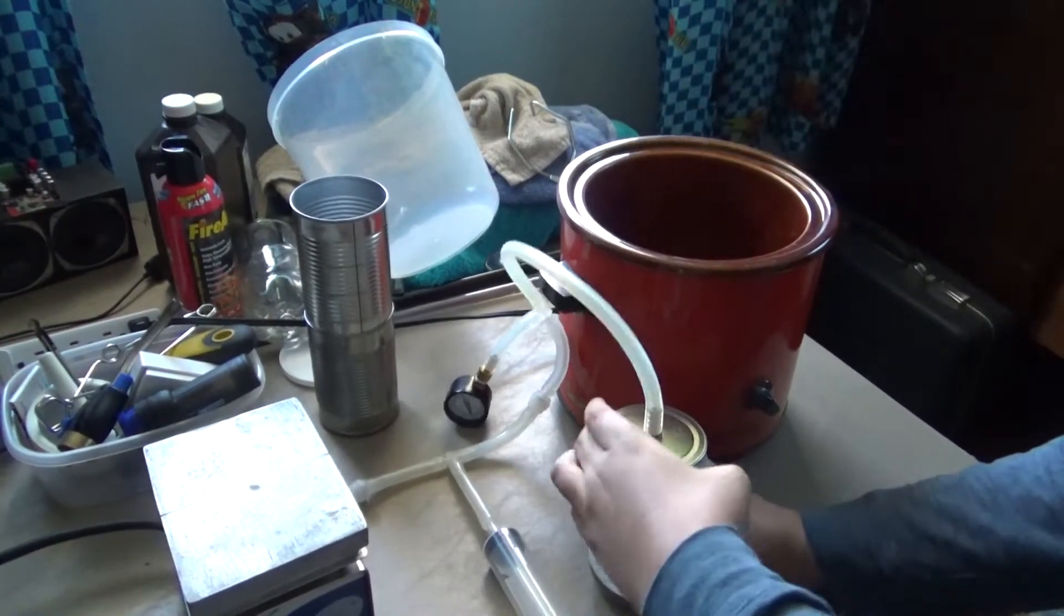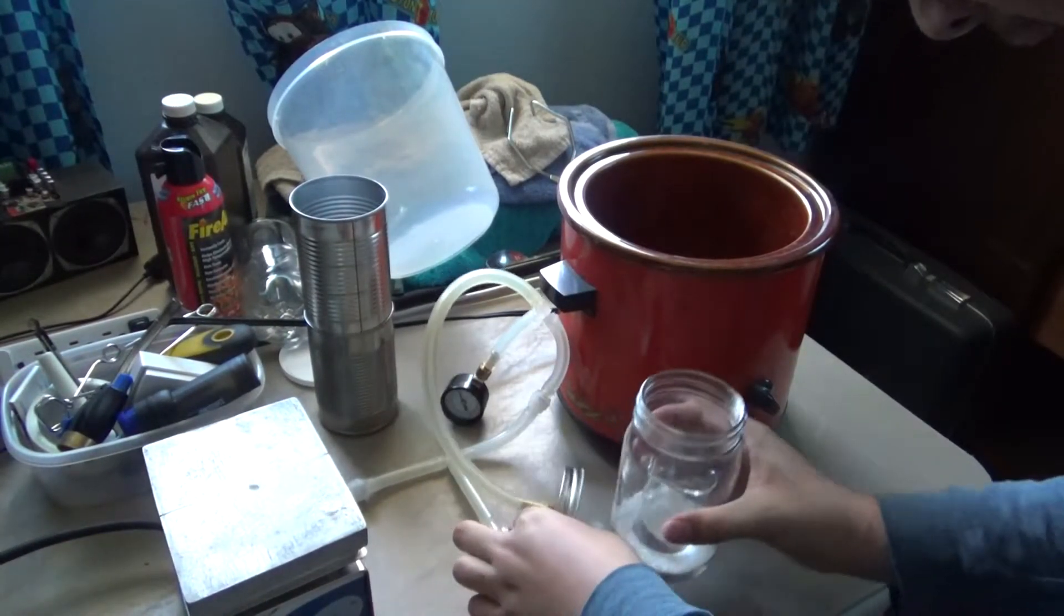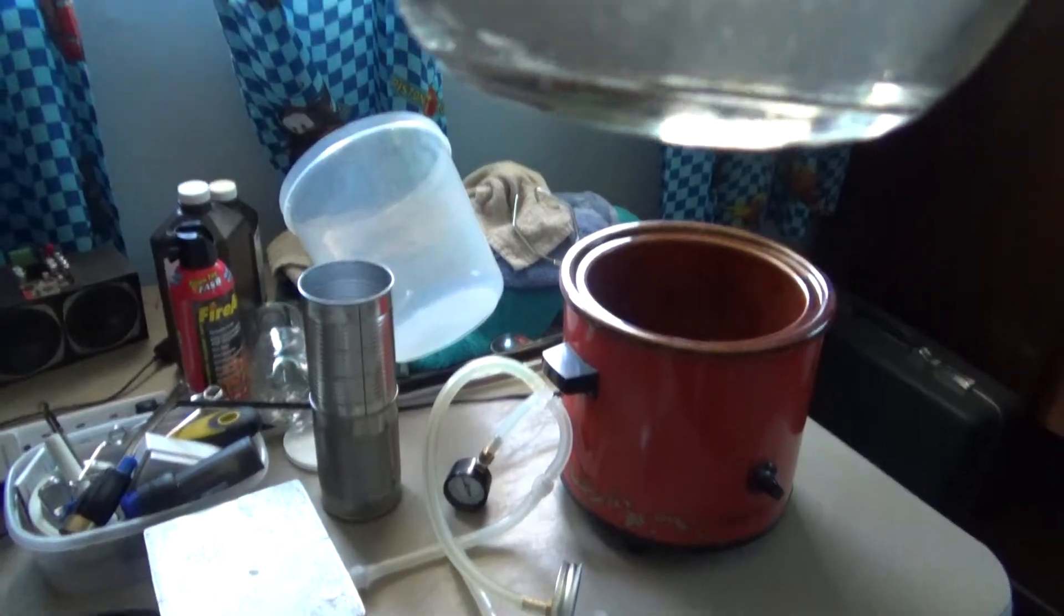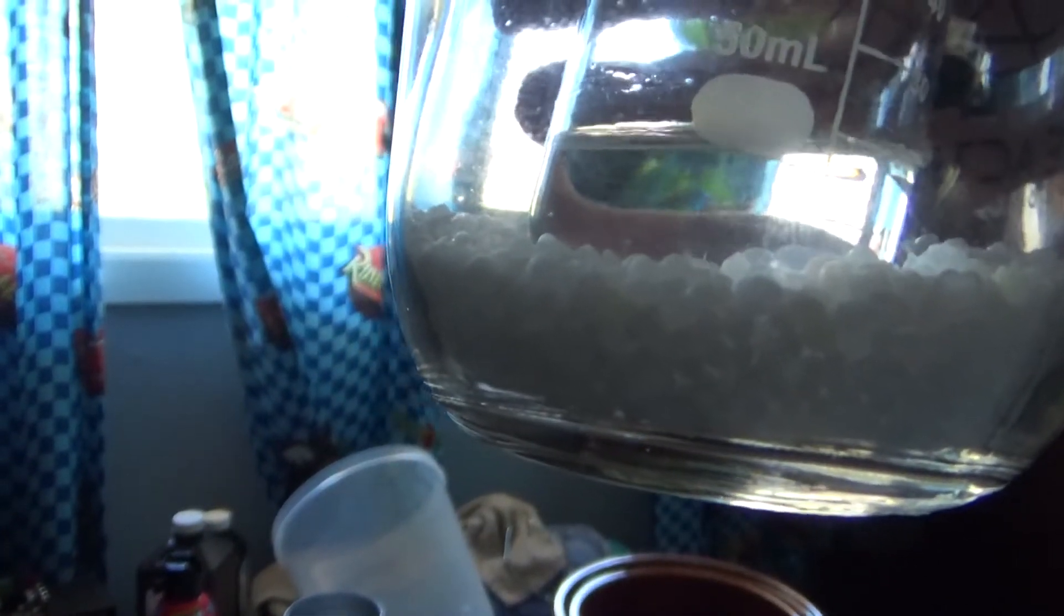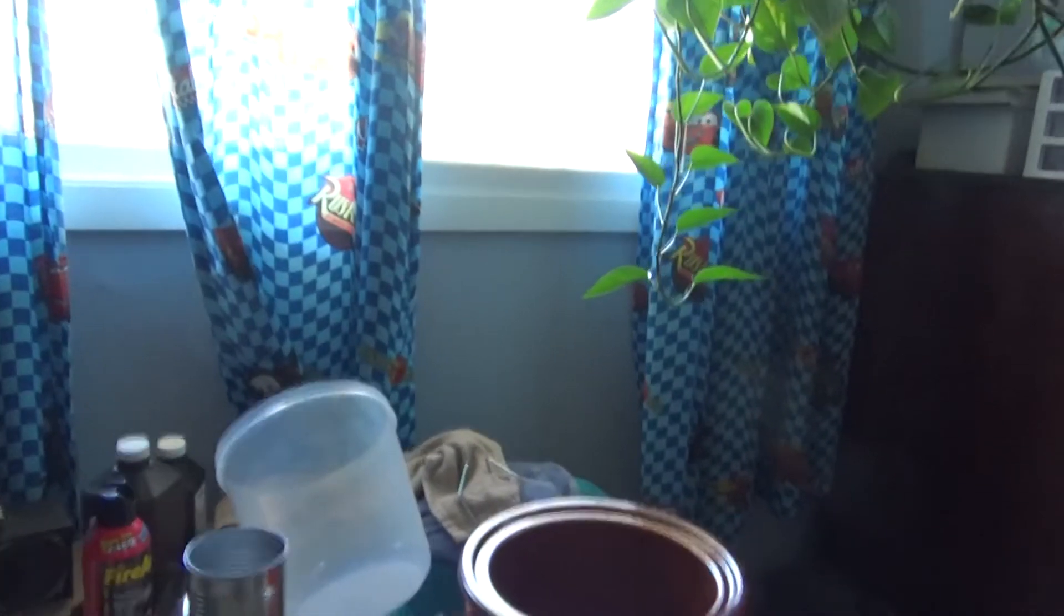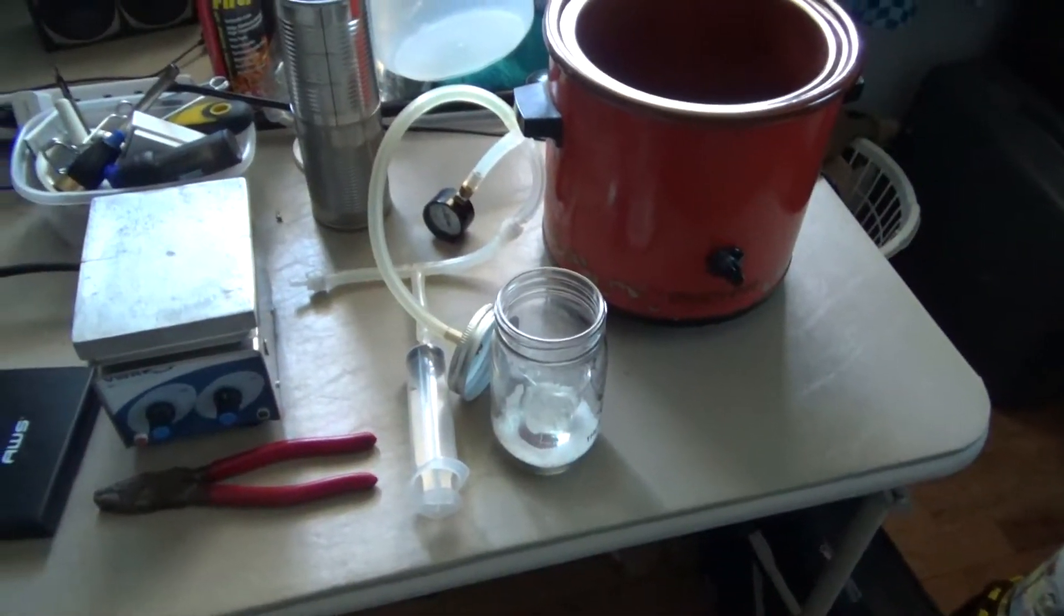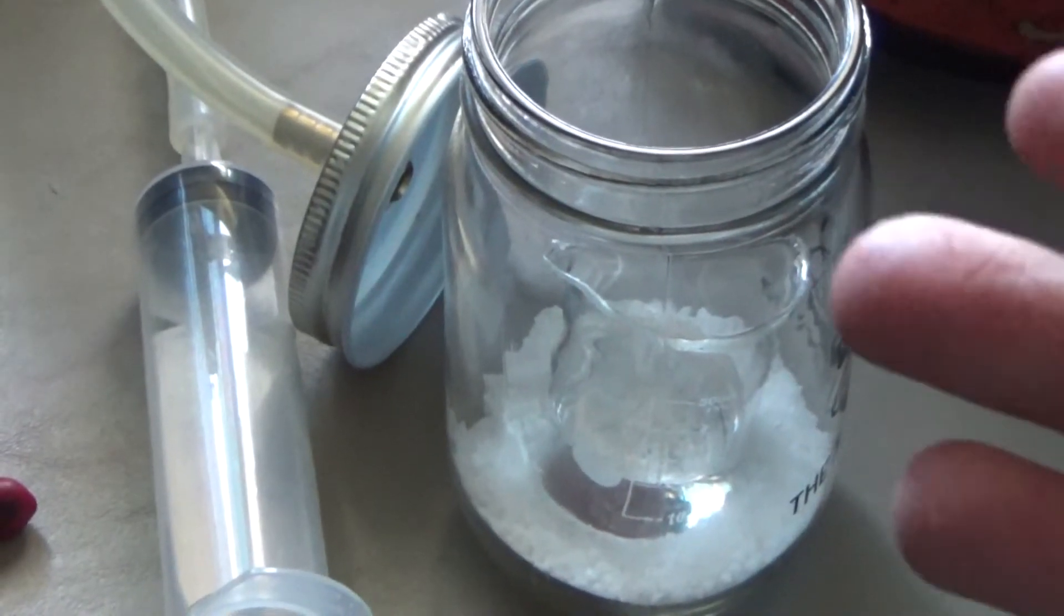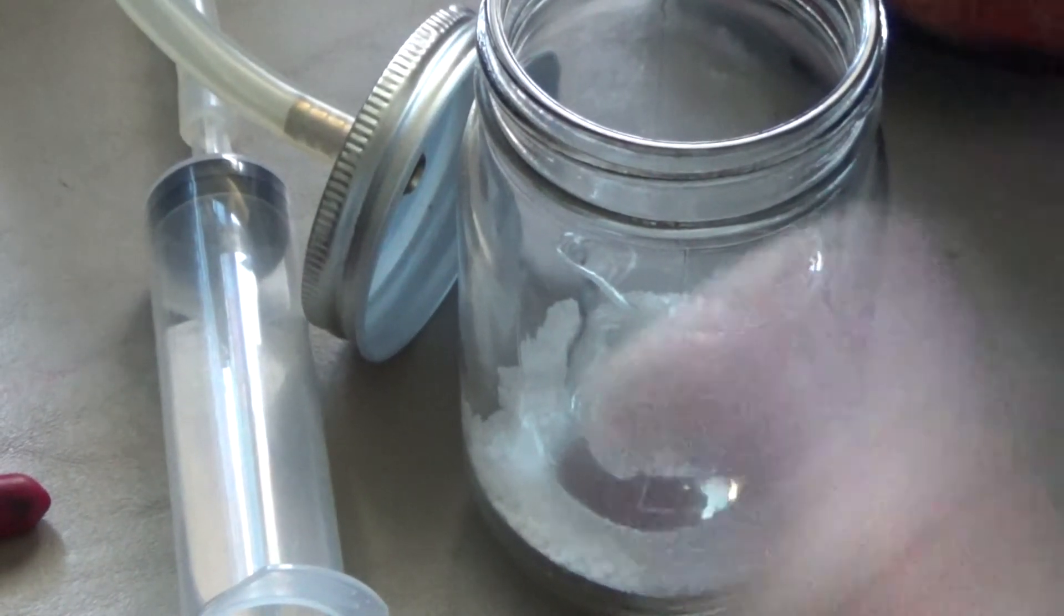And there we go. As you can see inside. Now look at this. This is really interesting. Hopefully you can see that, but as you'll notice, the sodium hydroxide beads on the top are actually slightly larger on average than the ones on the bottom. Okay, that's pretty snazzy, and I don't think that's normal. I've never done this before, so I'm not really sure what to expect. I'm kind of just going with the flow here. But if they are larger, that's probably because of an increase in water content. That would make a lot of sense, right? But enough with that.